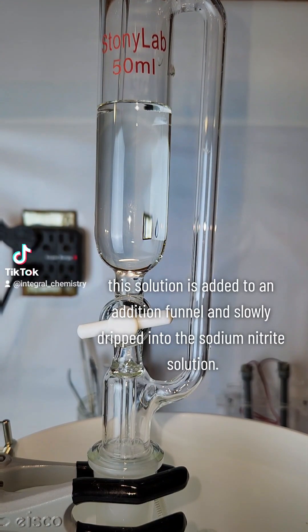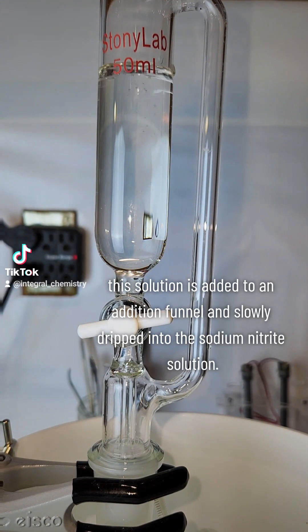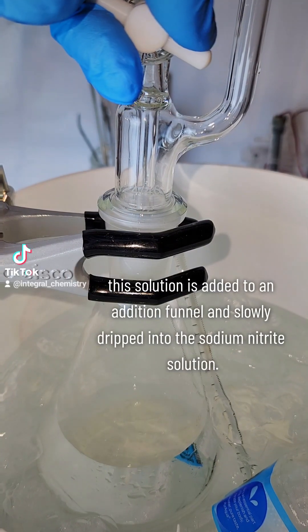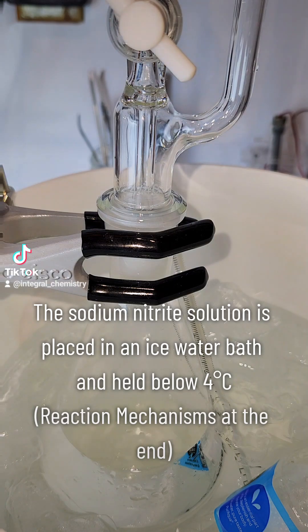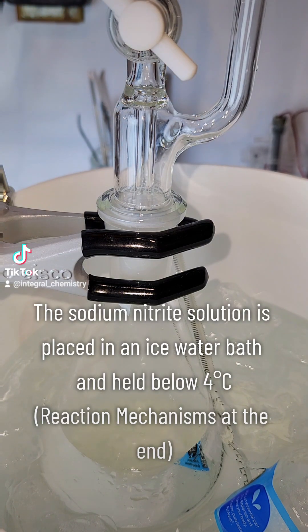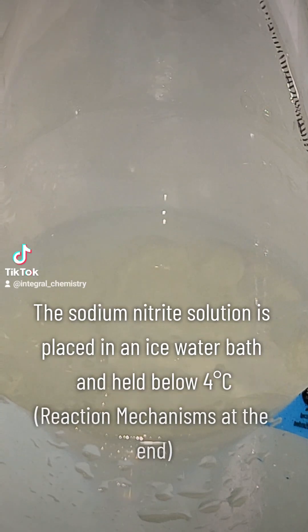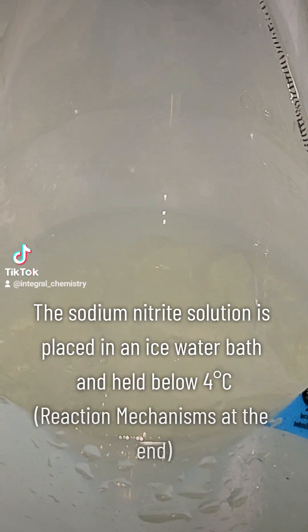The resulting solution is cooled to 0 degrees Celsius, and then it's poured into an addition funnel that's attached to my flask containing my sodium nitrite solution. I then rotate my stopper so that I can allow my acidic alcohol solution into my sodium nitrite solution dropwise.